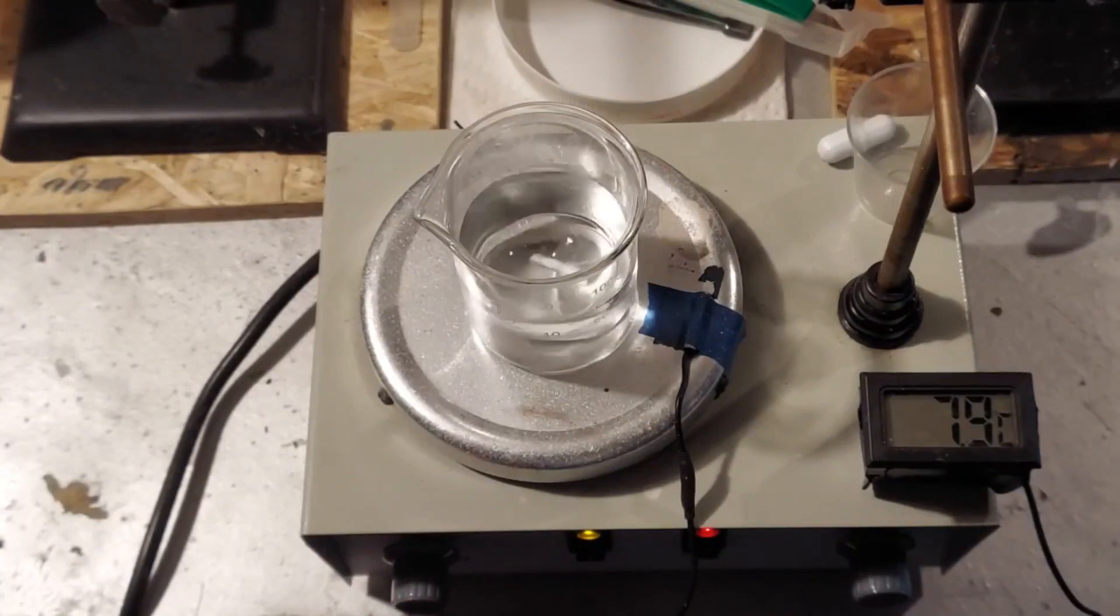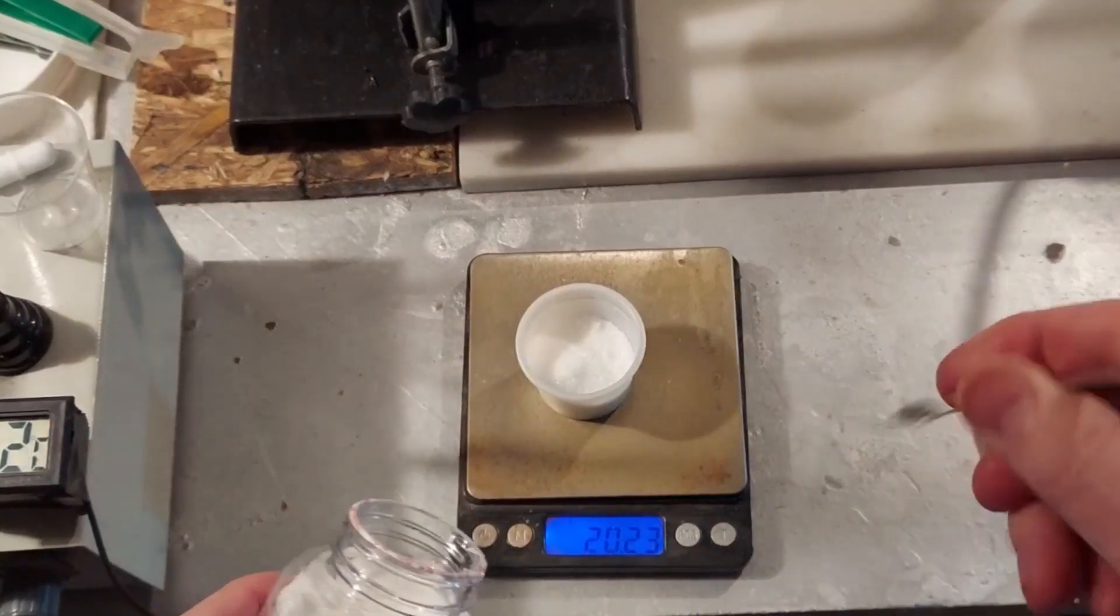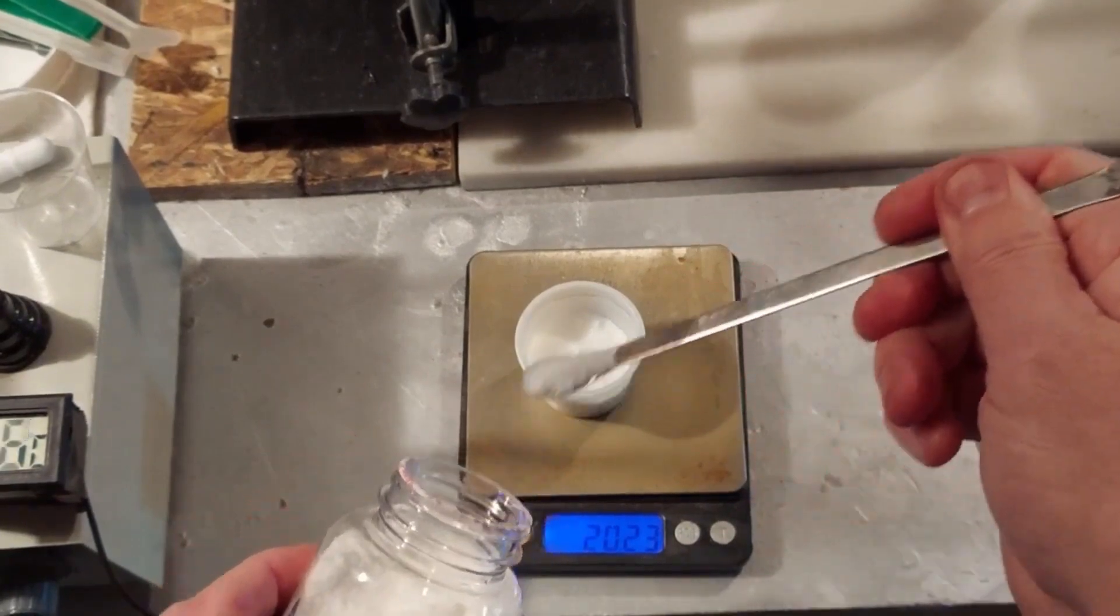But the ammonium persulfate, which I have right here, is very soluble in water. I'm just finishing up measuring my 24 grams of my ammonium persulfate here.